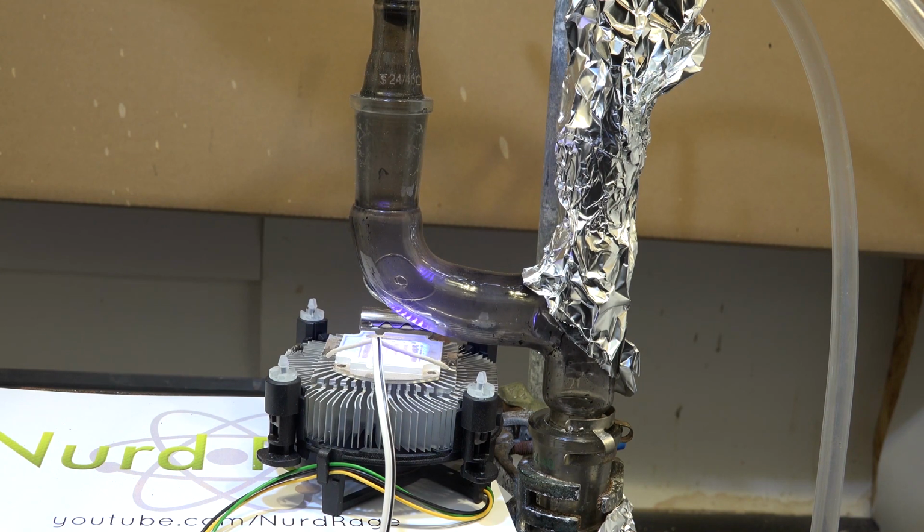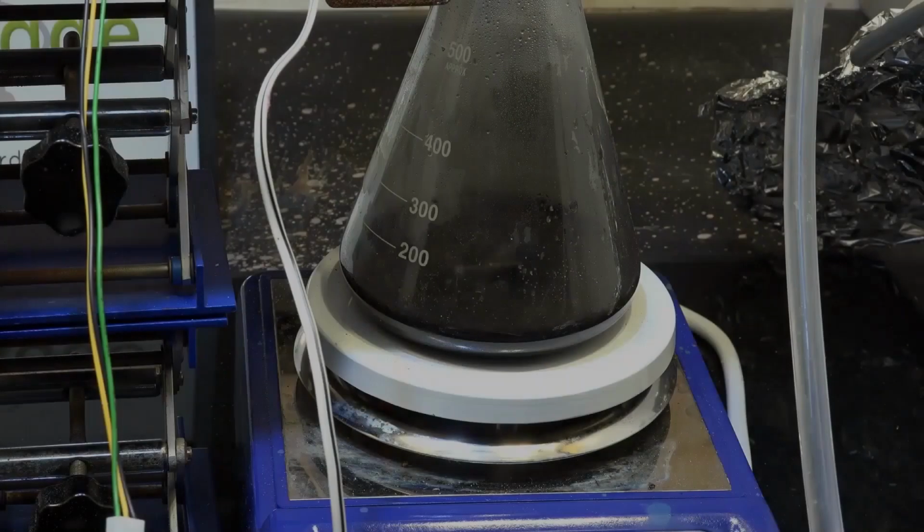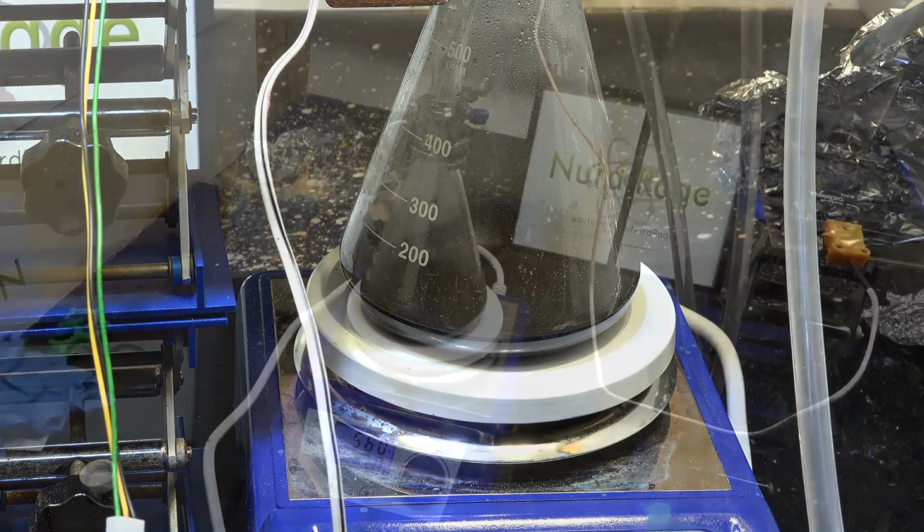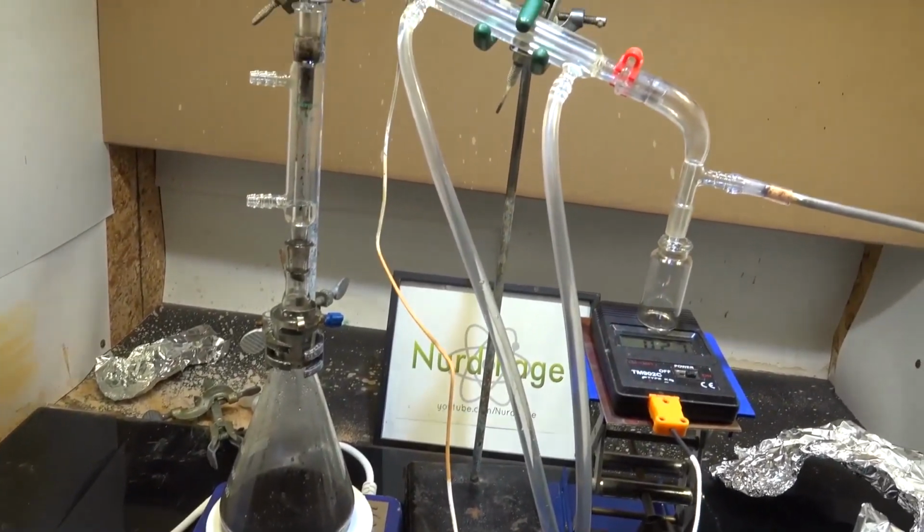Now for our product, we don't want this to happen, so we'll need to stop it. The process is similar to stopping combustion with regular fire. We just slow down the rate of chlorine addition to create a mixture too rich in fuel to burn. Here we go. Looks like the burning chlorine has been reduced. And here we are, the reaction is finished and allowed to cool. The flask should now contain p-Chlorobenzyl chloride as well as unreacted p-Chlorotoluene, as well as any decomposition products from the burning we saw earlier. Now rearrange the apparatus and set up for fractional distillation.